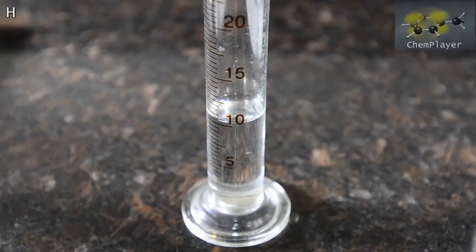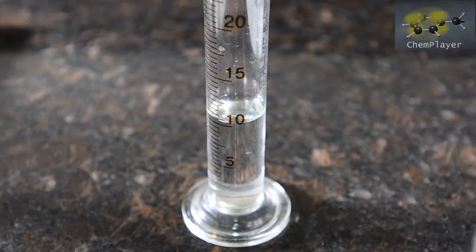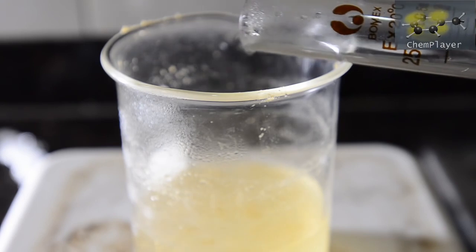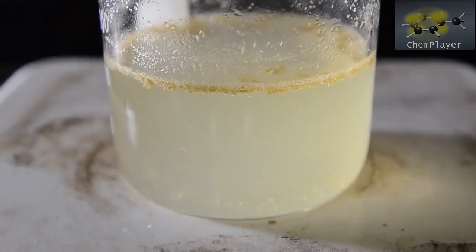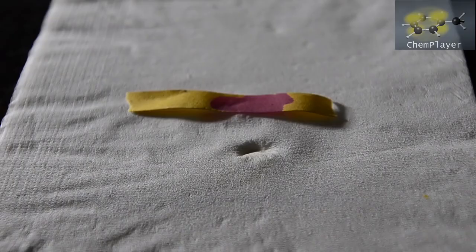Here's 10 ml of concentrated hydrochloric acid, which should be more than enough to convert all our product into the carboxylic acid. We add this to the hot mixture. Let's check the pH. Strongly acidic.